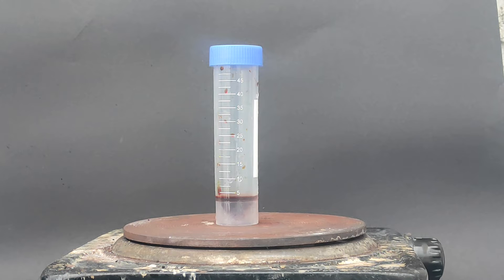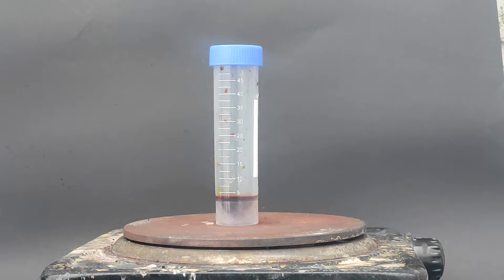I just wanted to mention how fun it is to me that the only tutorial for hydroiodic acid on YouTube is on a channel called Walter White.